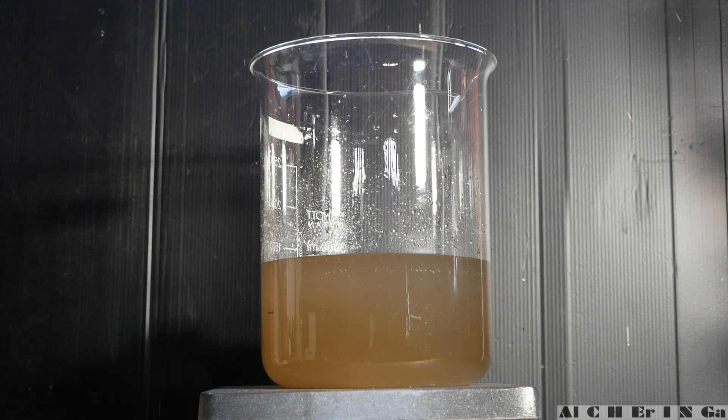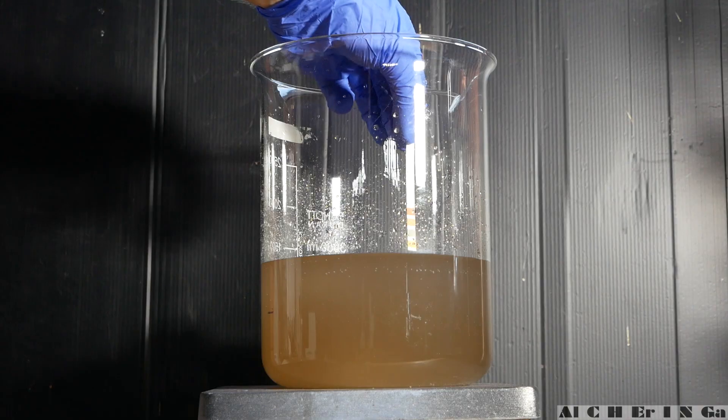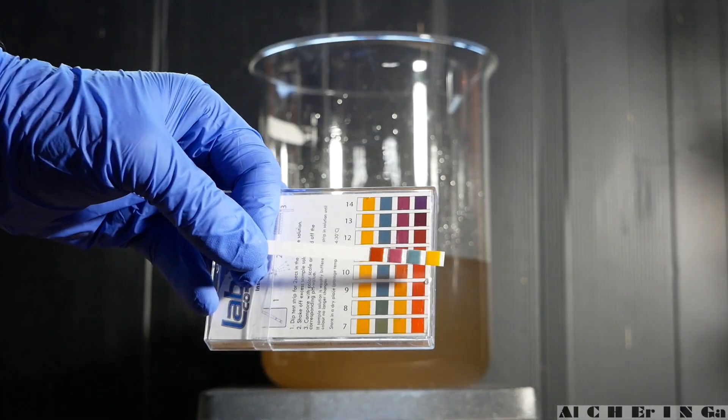Also, the mixture has turned to a more brown color. Now, use pH paper to check that the correct pH of 12 is obtained.